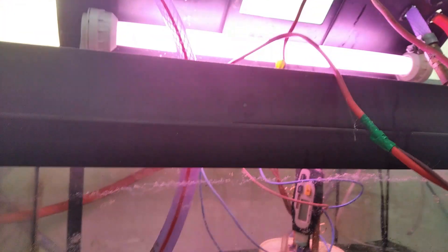So yeah, this is the update of my perchlorate cell. And of course, I got the light — everything's better with lights.